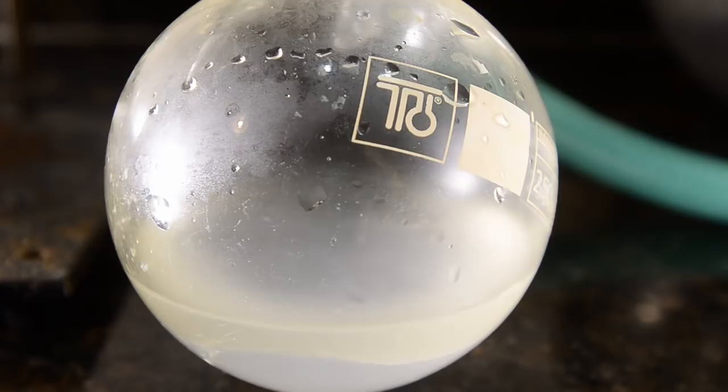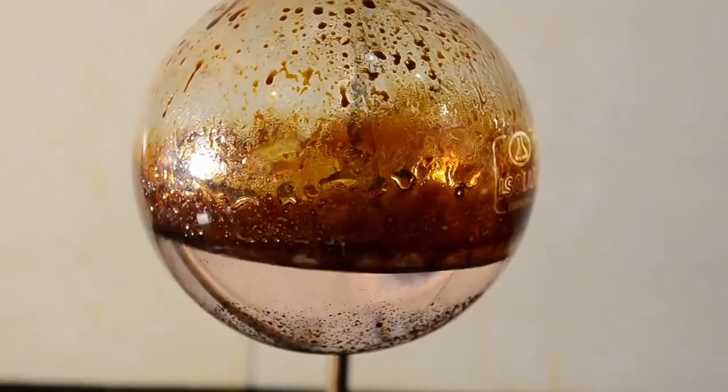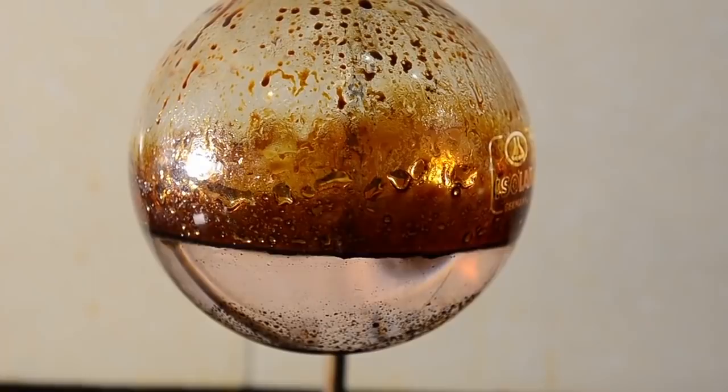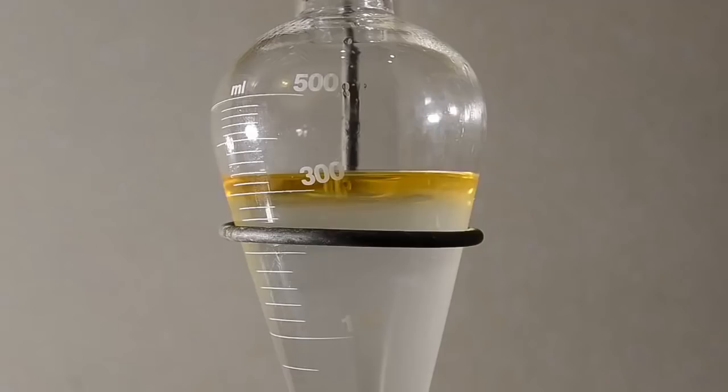At the end of the distillation, there's some brown gunk left in the boiling flask which can be removed with a little acetone. Here's the distillate we collected. Around 325 ml in total.